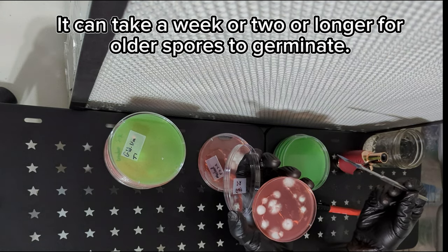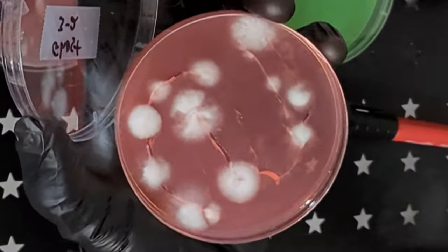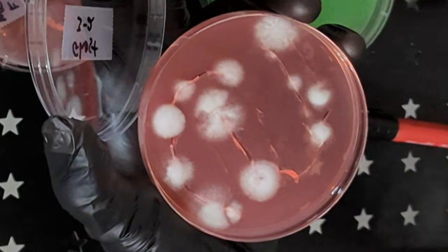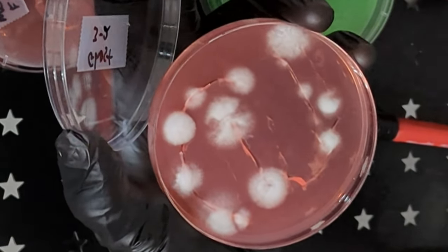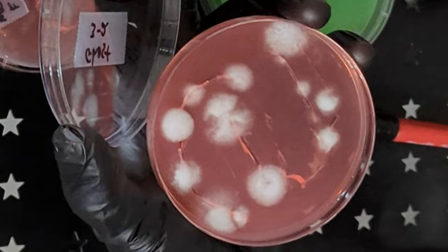So colonization speed is another way to judge whether or not you're working with a clean culture or a contaminant. After other fungus and molds you might run into different contaminants: bacteria.